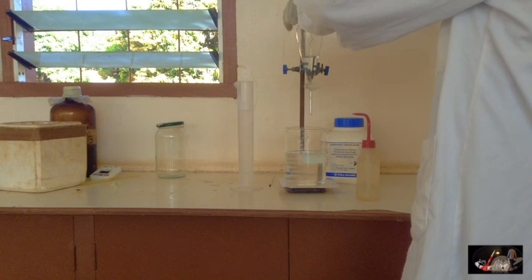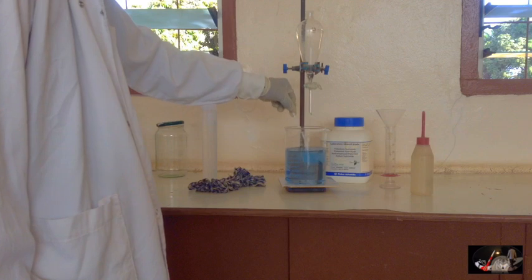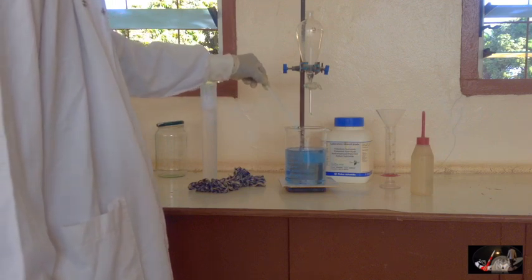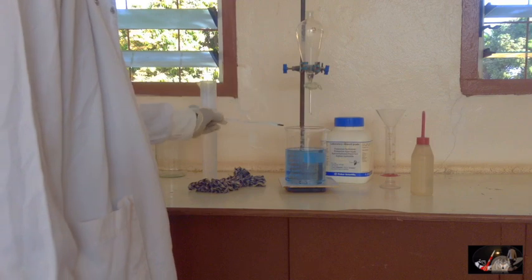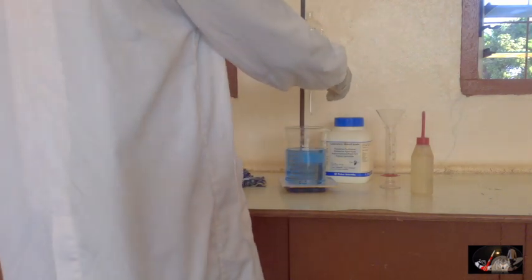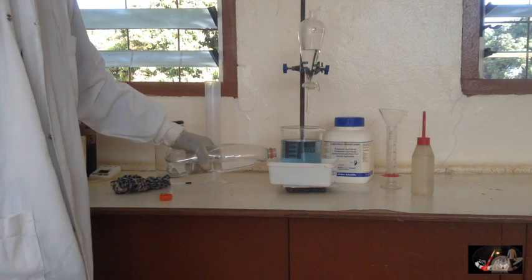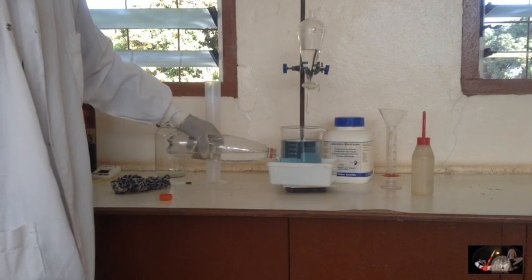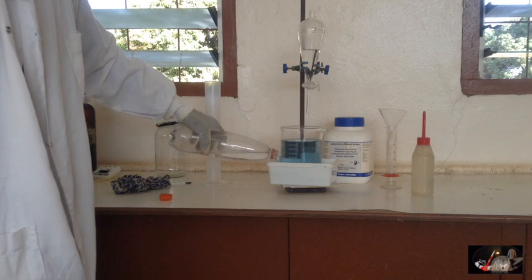When I was performing it, a wire tied to the top of the funnel dropped inside. The wire, which is made out of copper, is turning the solution blue. This is a problem. However, I will proceed and fix the problem as we go along. Mixing these two concentrated acids releases a significant amount of heat, so I had to place the large beaker inside another water bath.